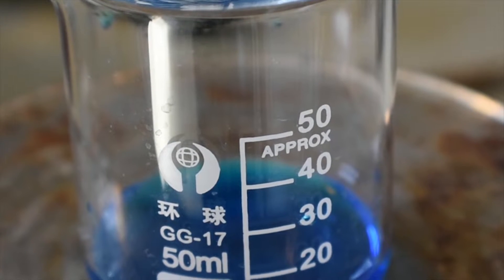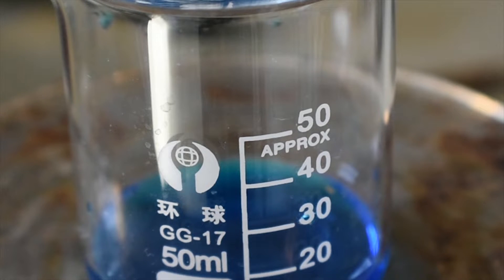I'll skip to when I'm done adding all the hydroxide. Now we have the nice, beautiful blue, clear solution of copper nitrate in water. What we're going to do is set this off to the side for a few minutes — we'll need it soon.